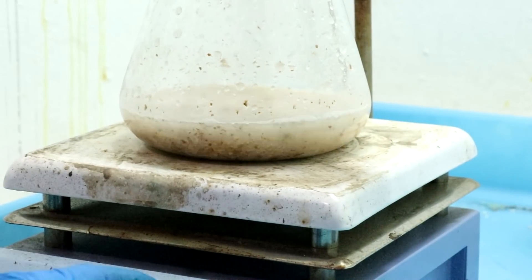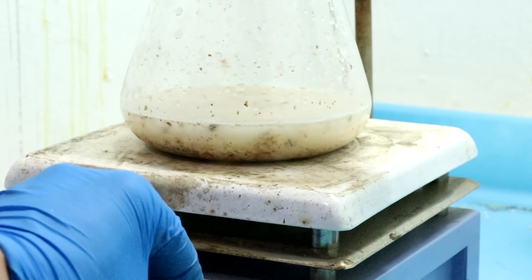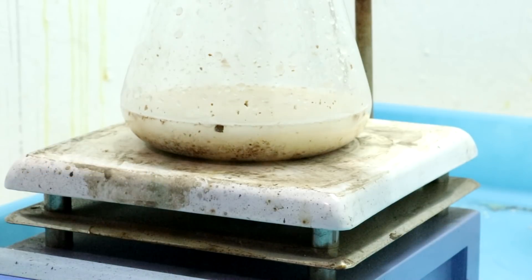Turn on a stir bar. I think there's something wrong with my stir plate. It's like all the way on or all the way off.